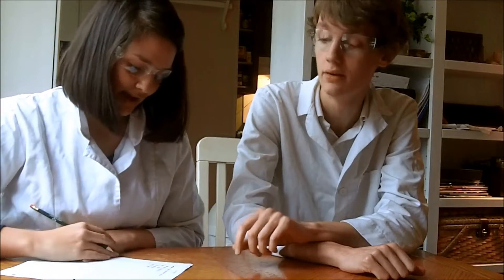Can you remember the directions in your head? Yeah, I mean I've got this down. The only thing is the measurements — for this it's a 5-to-3 ratio. Five parts potassium nitrate, three parts sugar. Okay, do you want to look it up just to be sure? Yeah, let's do that.